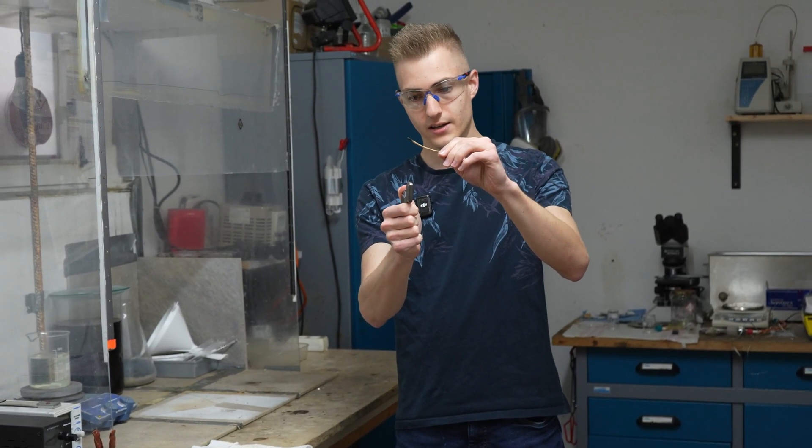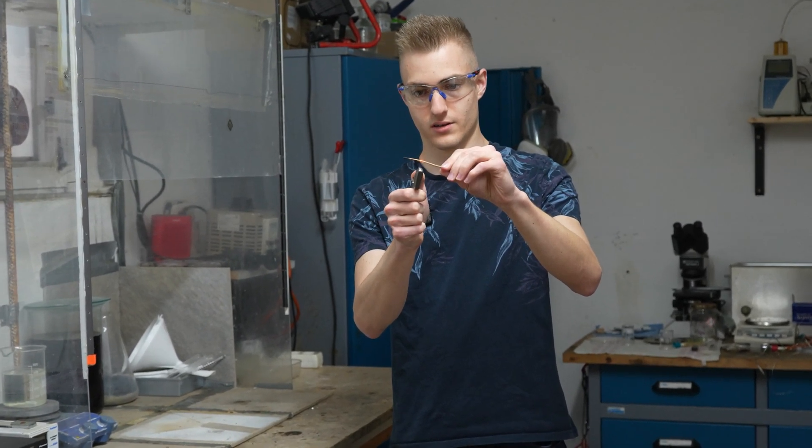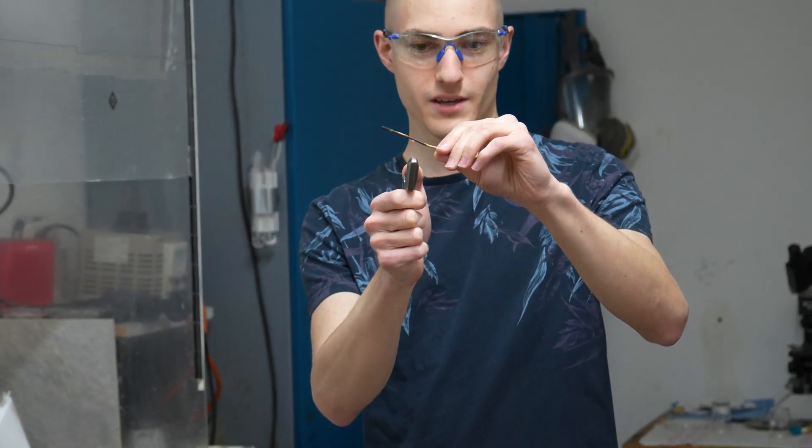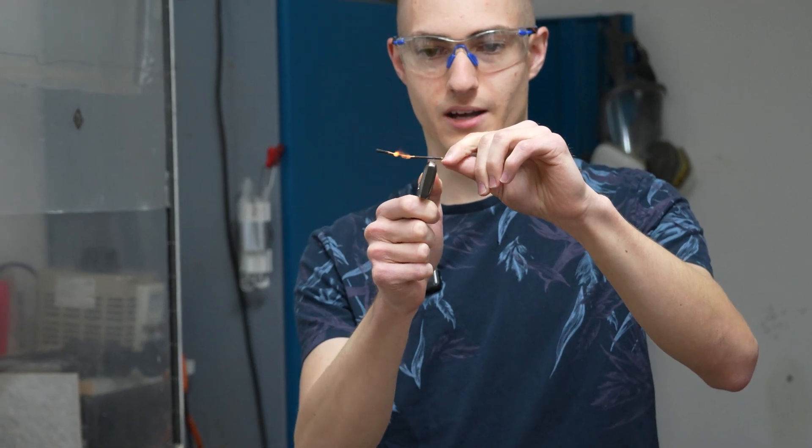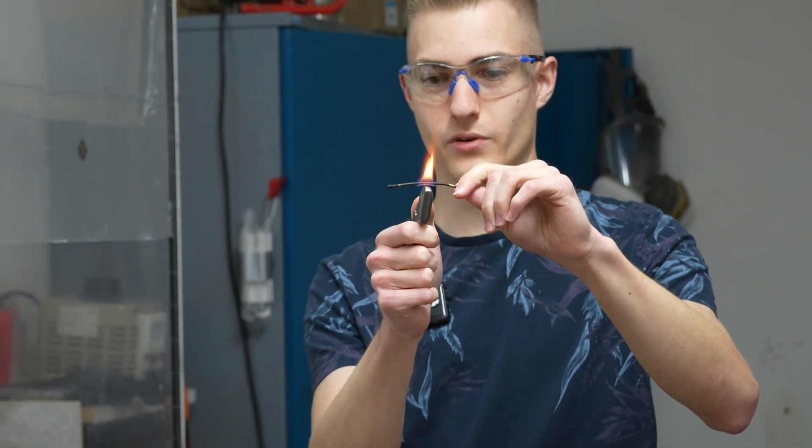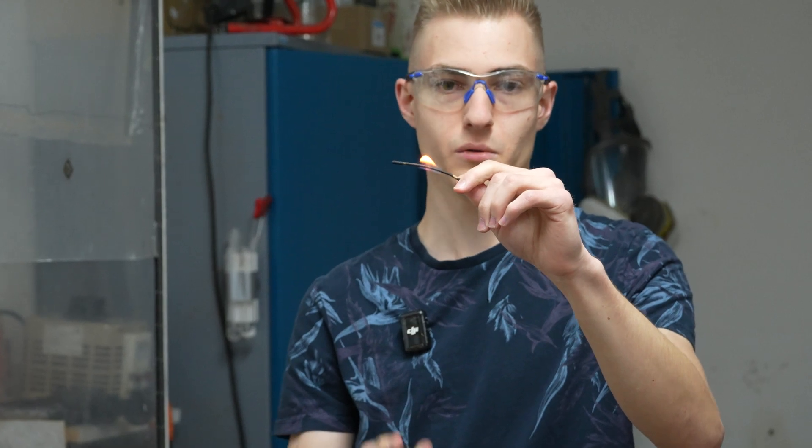We can see however if we really try to light it that it does burn somewhat better. You can see kind of some self-oxidation here and there but it's just charring, and if we really want to burn it then it just looks like wood.